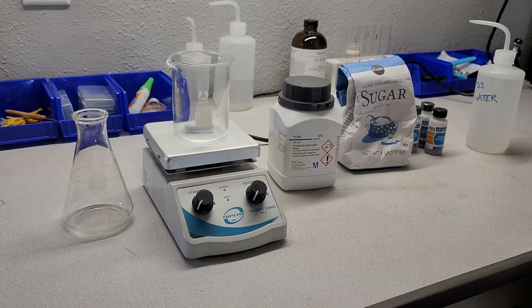What we'll need for this experiment is potassium permanganate, sodium hydroxide, otherwise known as lye. Now I'm actually going to be using potassium hydroxide because that's what I had sitting around, but either will work just fine. Distilled or deionized water, and finally, some plain old-fashioned sugar.